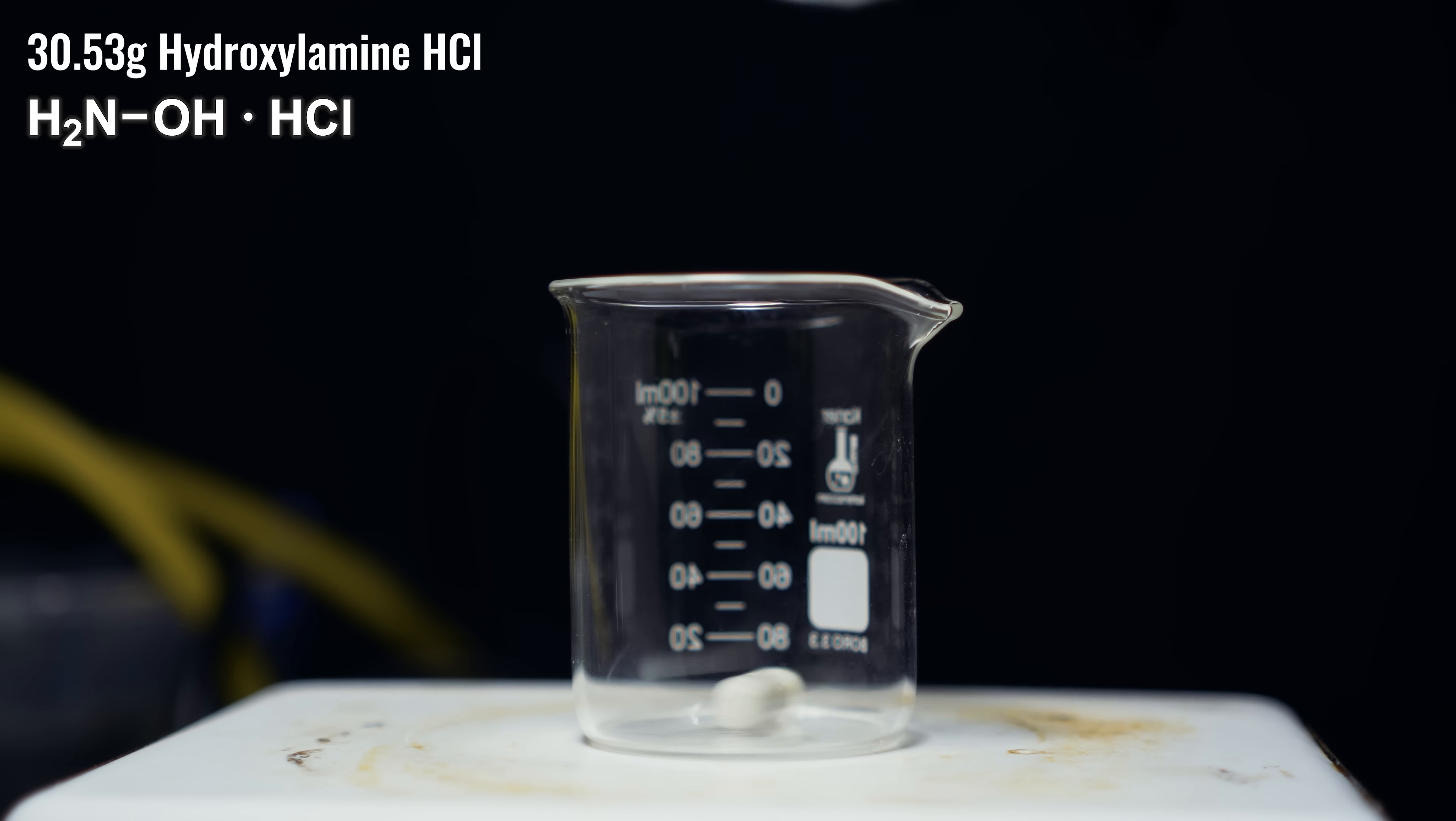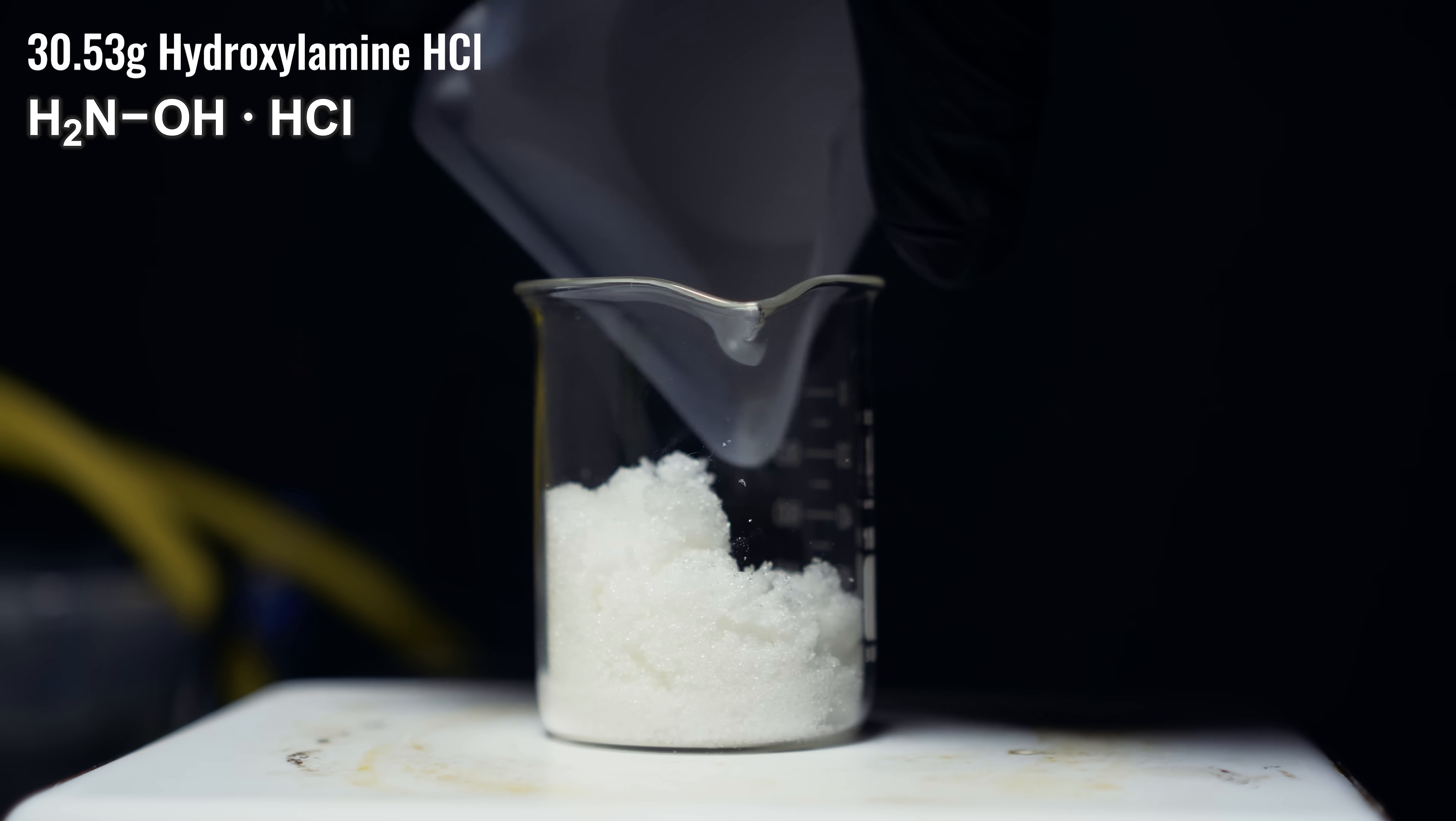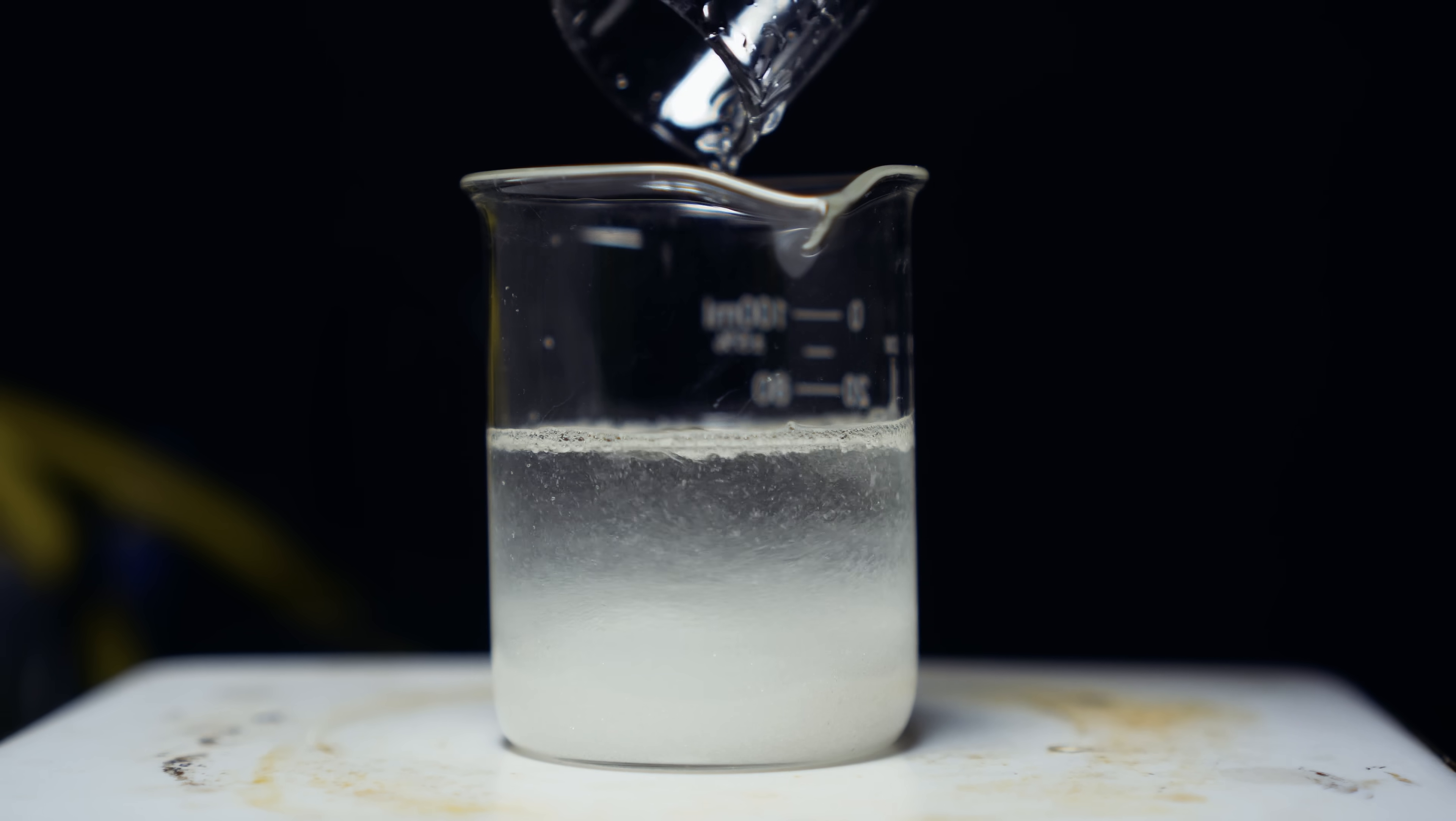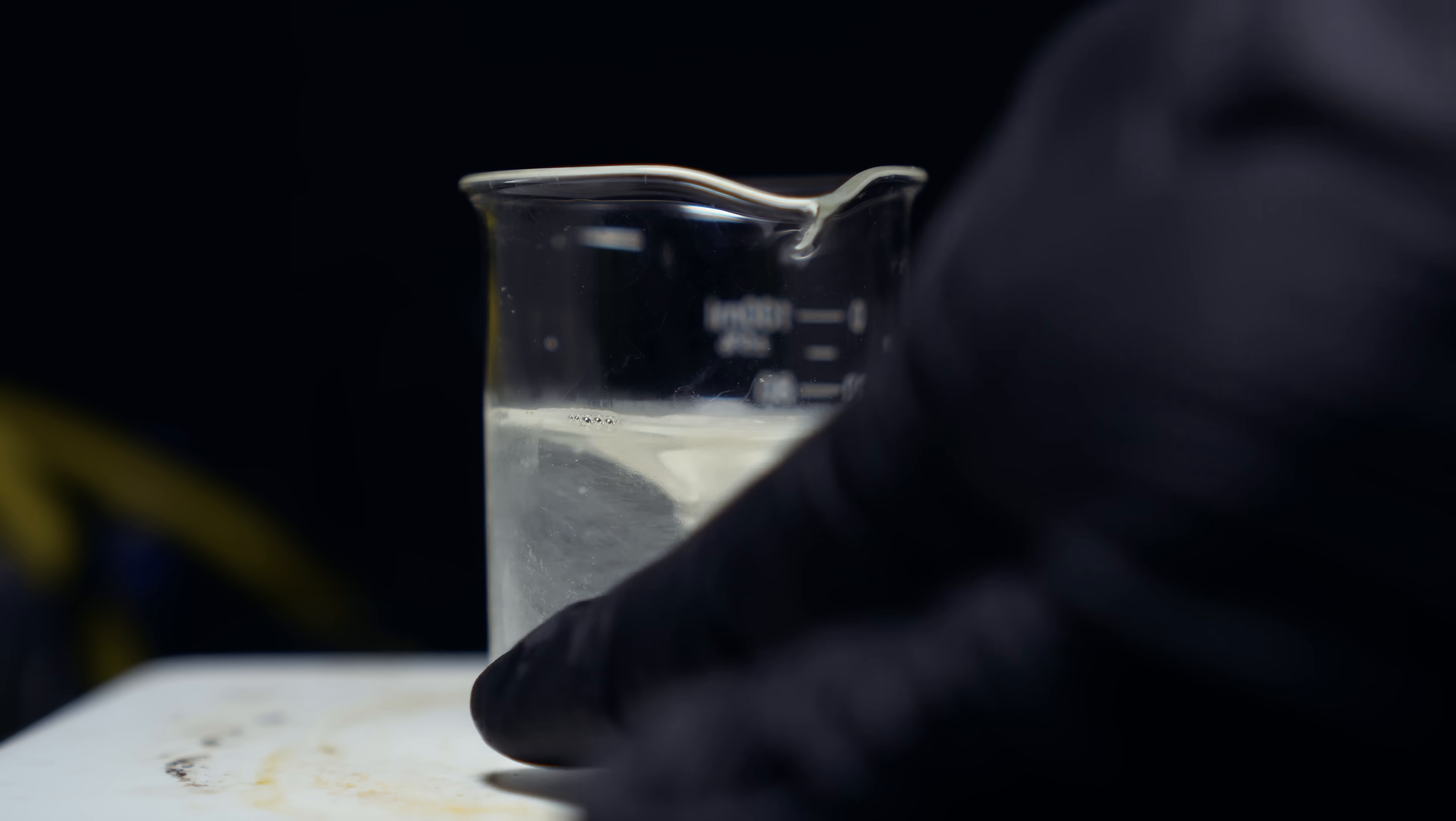To get started, we need 30.53 grams of something called hydroxylamine hydrochloride. This is also an extremely hygroscopic material, which pulls moisture from the air. To this, we're going to add 50 milliliters of distilled water. The dissolution of hydroxylamine hydrochloride is actually endothermic in water. Let me explain this. Lattice energy is the energy needed to break ionic bonds. And when we dissolve this, it actually uses more energy to break these bonds than it releases. And that makes this process endothermic.